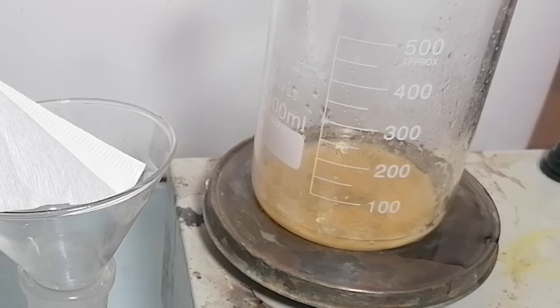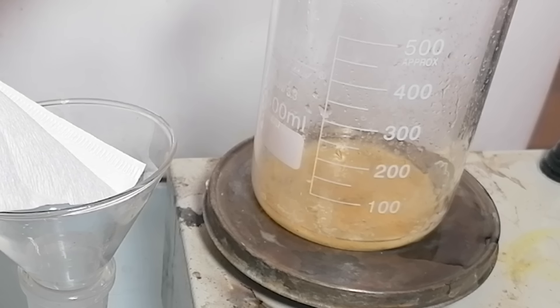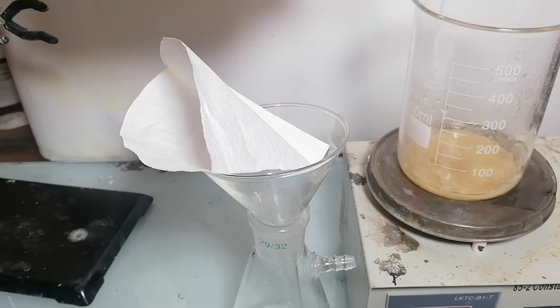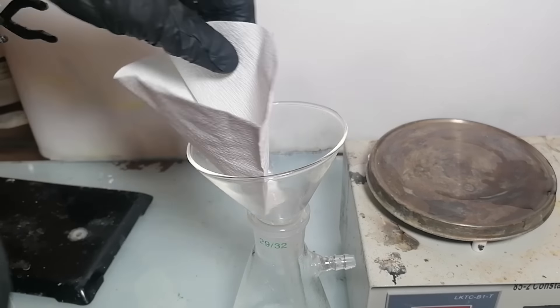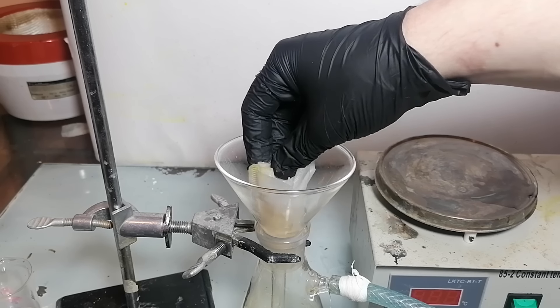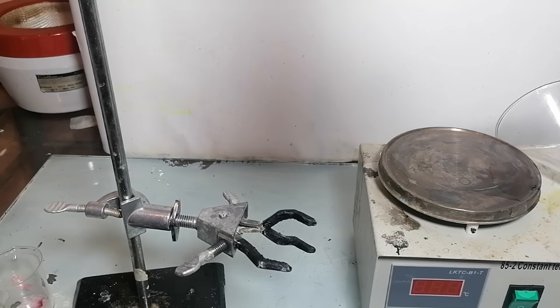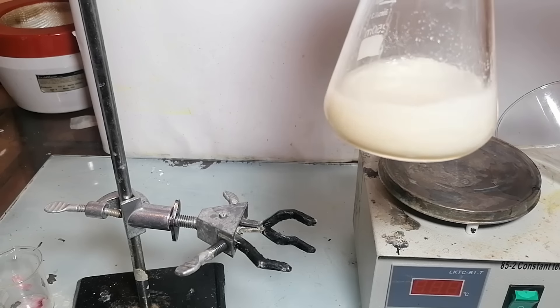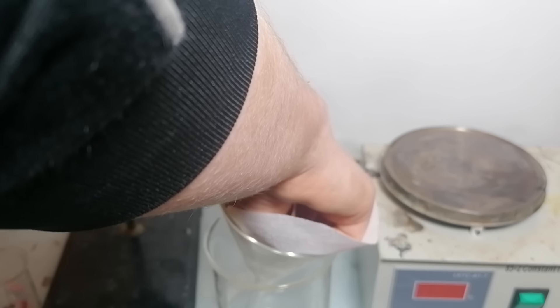As an editor's note, I actually just noticed that I was pouring a bunch of water into the beaker on the right — that's me pretty much underestimating the solubility of methylamine. Methylamine is extremely soluble in water and because I basically waterboarded all of it, most of it just dissolved into the solution. So don't be like me and only wash with small amounts of water. After pressing to filter faster, I decided to recover some methylamine by adding some acetone to crash it out. Methylamine is insoluble in acetone, so as acetone's concentration rises in the solution, crystals start to form. However, do keep in mind there's still some of that annoying ammonium chloride in the precipitate, so we have to purify it even further. The whole thing was filtered and then put back into the same flask.